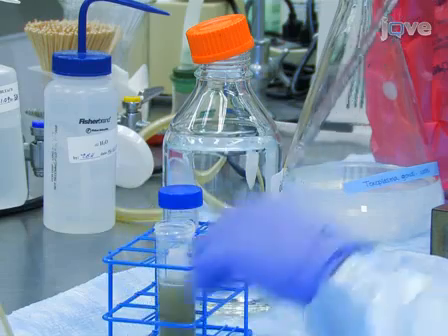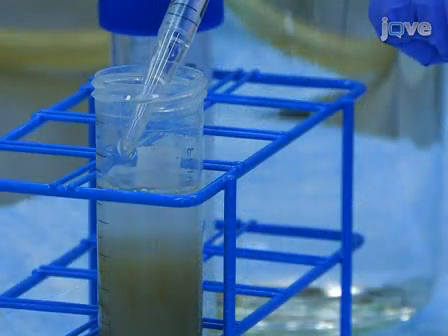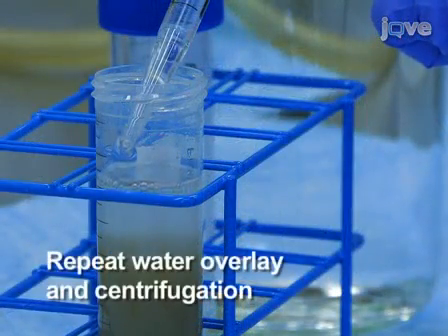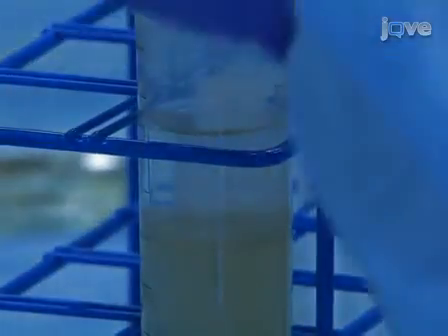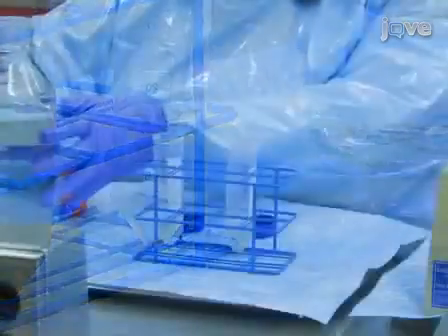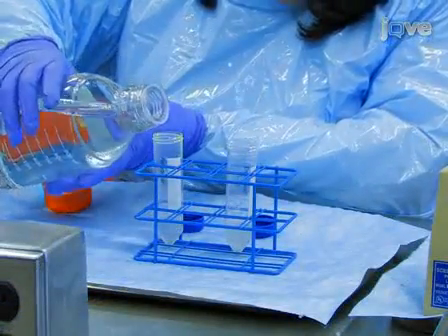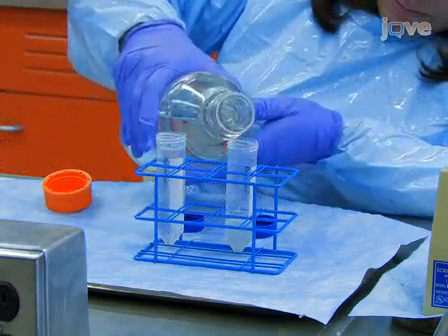Repeat the previous water overlay and centrifugation steps once more. After the spin, collect the top water and interface layers and transfer them to a new tube. Use double distilled water to bring the volume of the two oocyst interphase solutions to 50 ml.